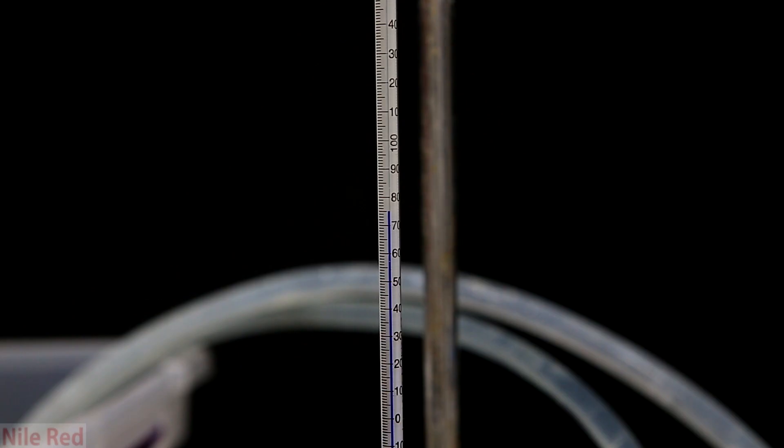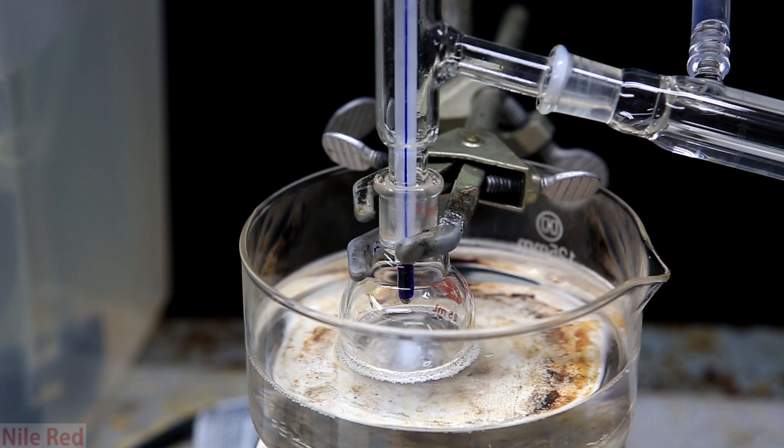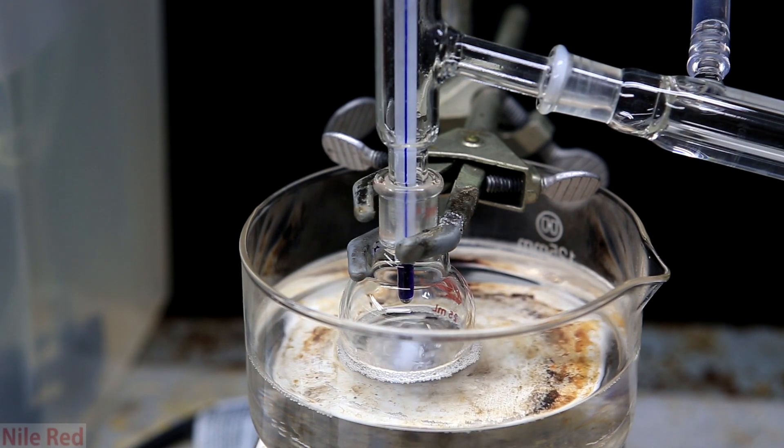Then a very small amount of stuff came over at around 75°C which I assumed to be benzene. After that I quickly slid down the thermometer so it was practically inside the round bottom flask.